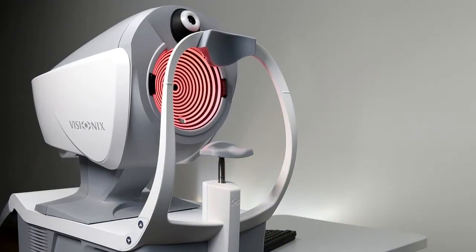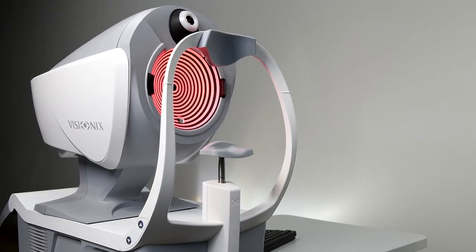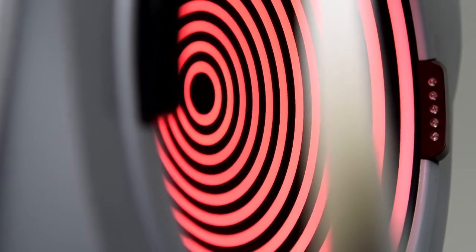You can use this machine either to perform complete examinations of the anterior segment of the eye or specific examinations.